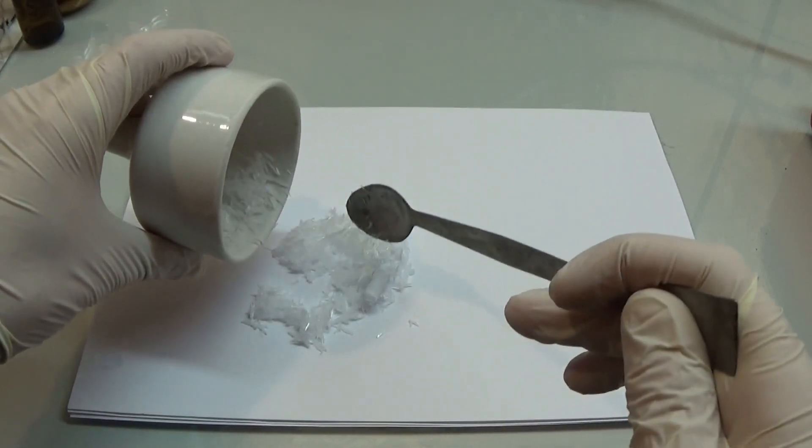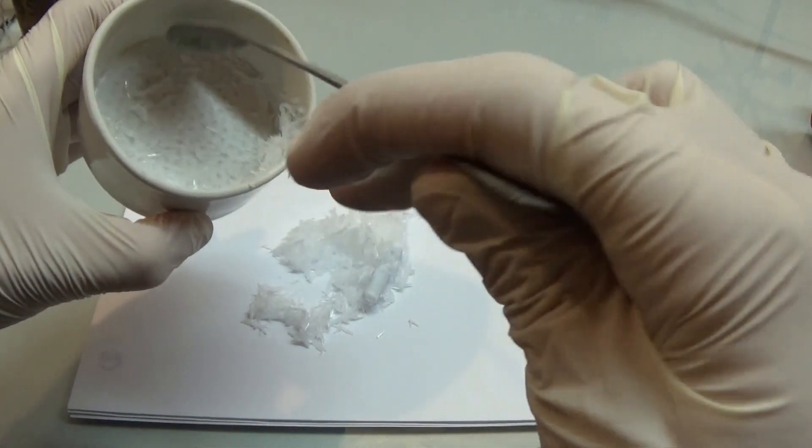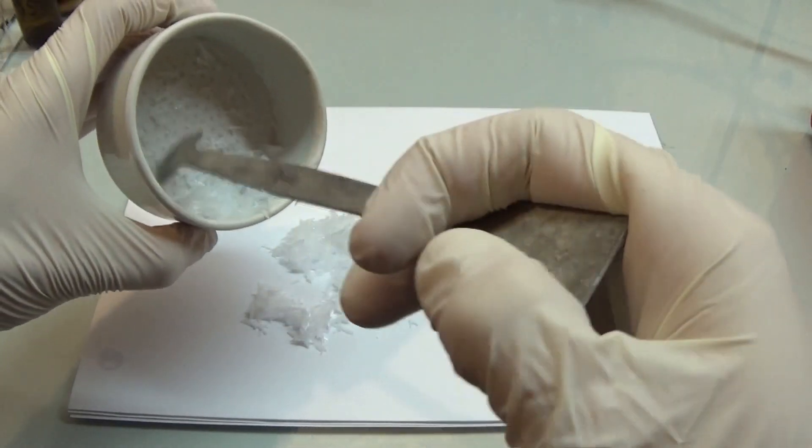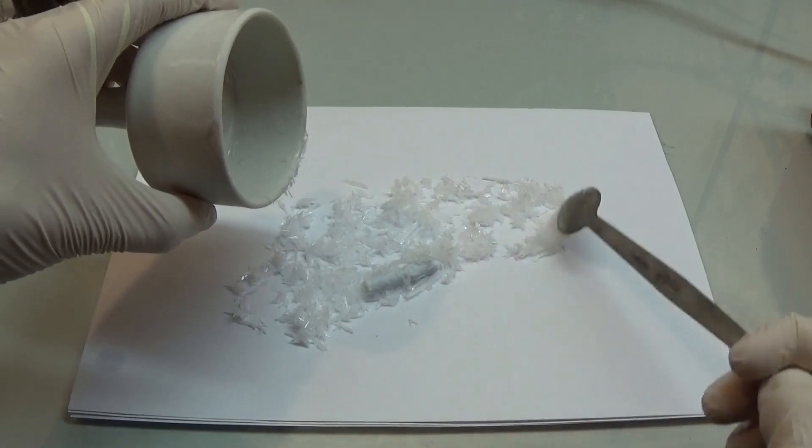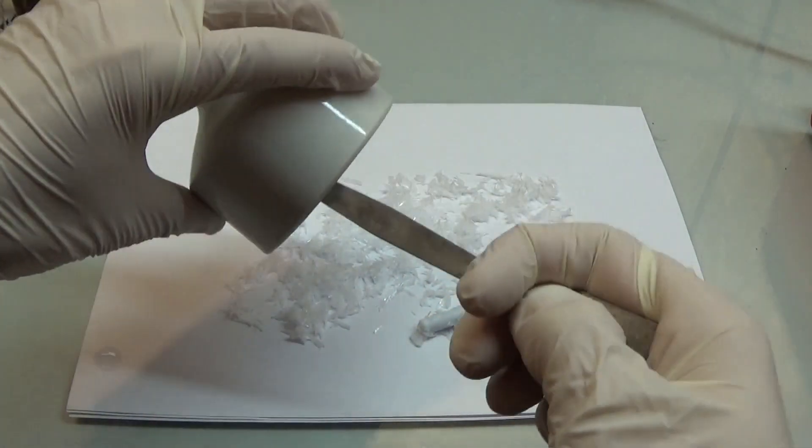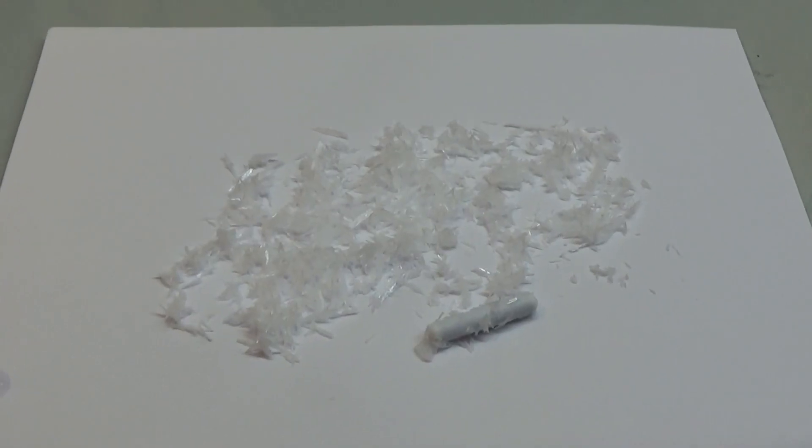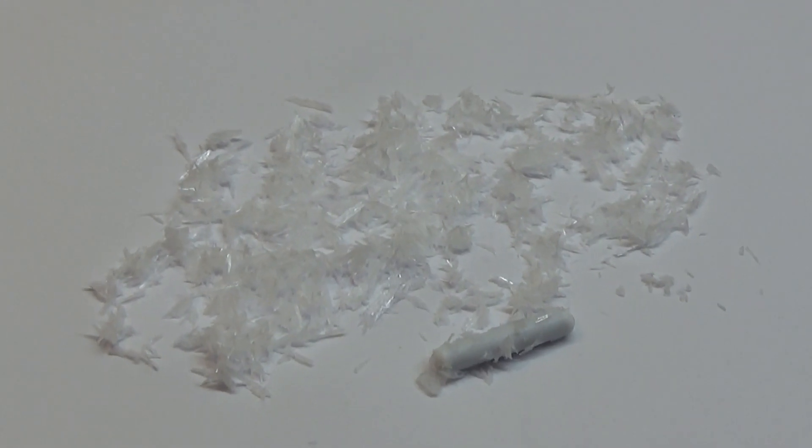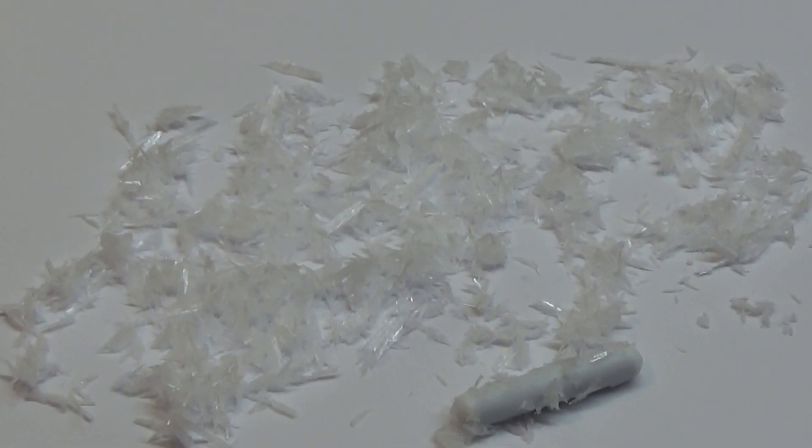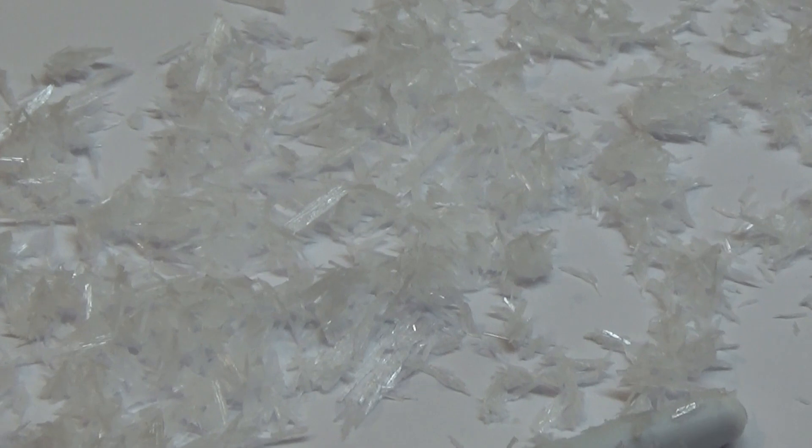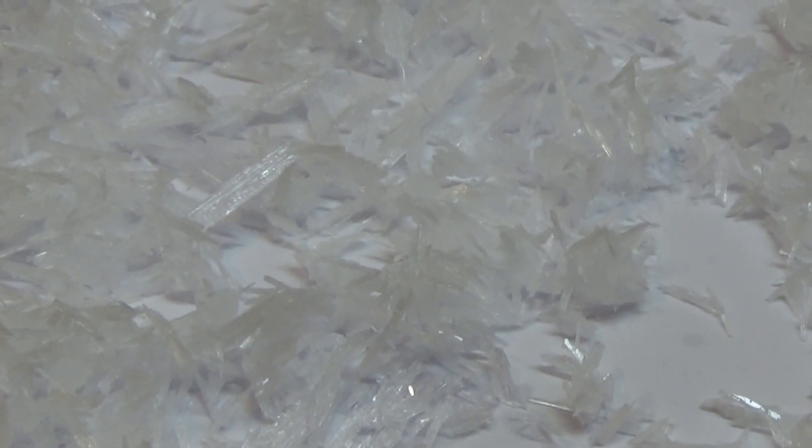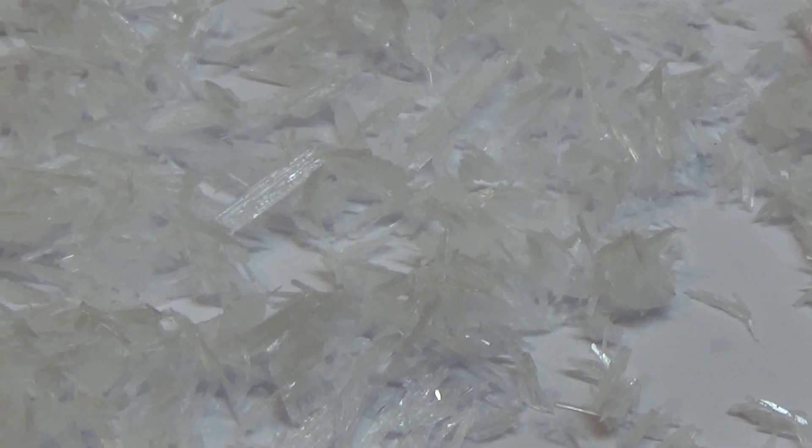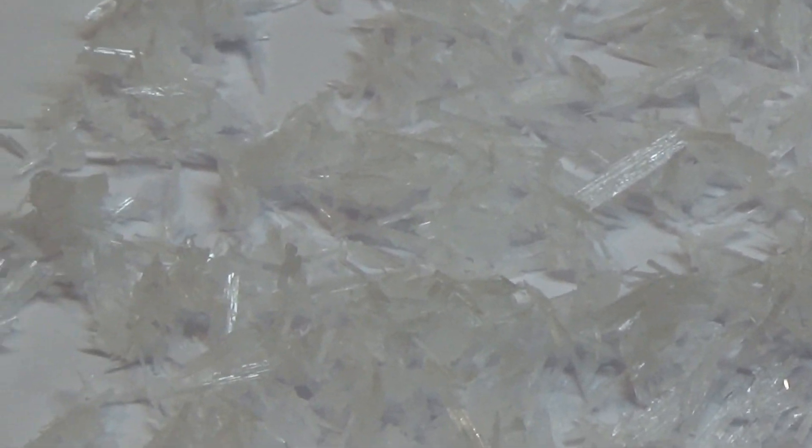After the filtering we have to dry our product. In this case it is very easy. We just put it on some paper and let it dry out. And again look at them, they are adorable. Just makes my heart melt like a thermonuclear runaway.